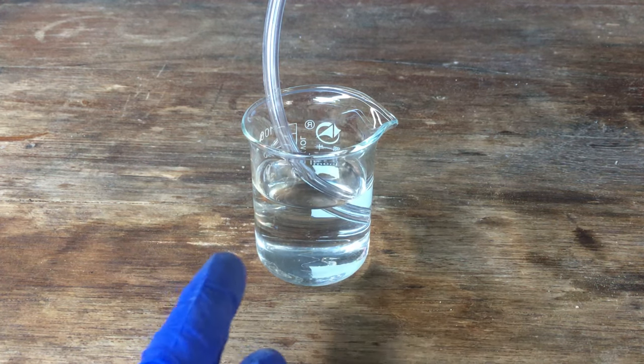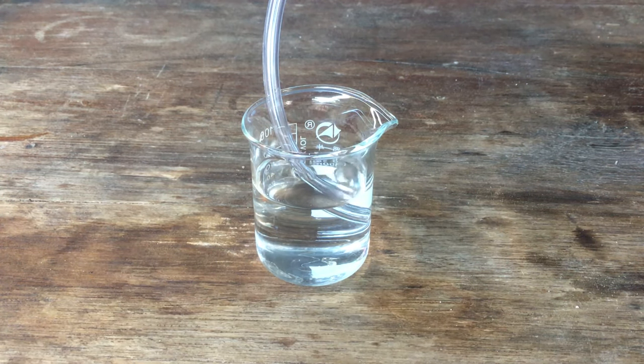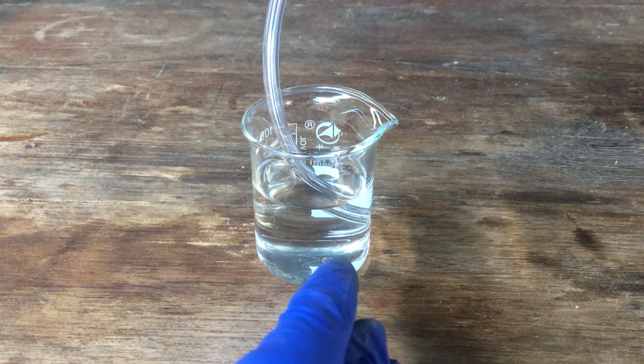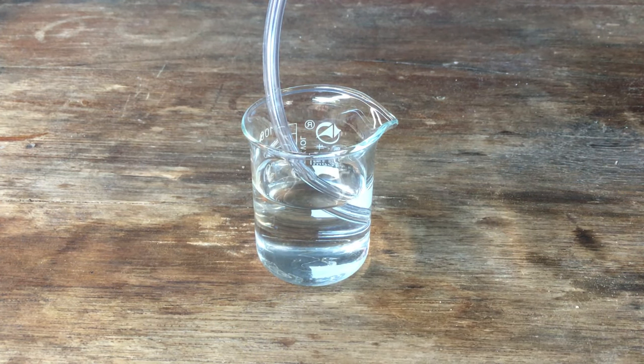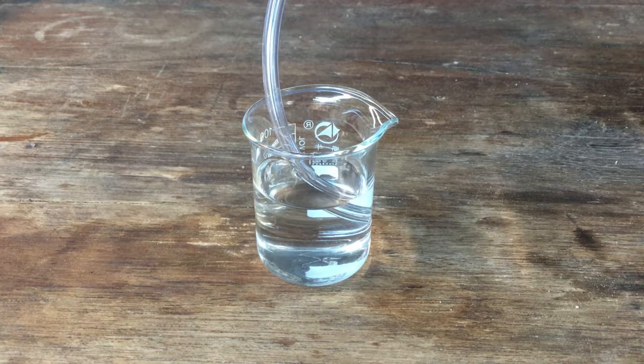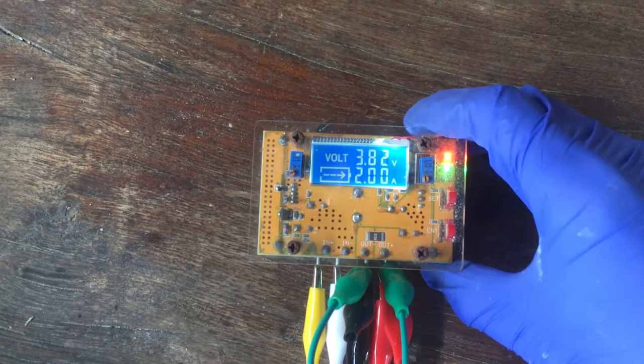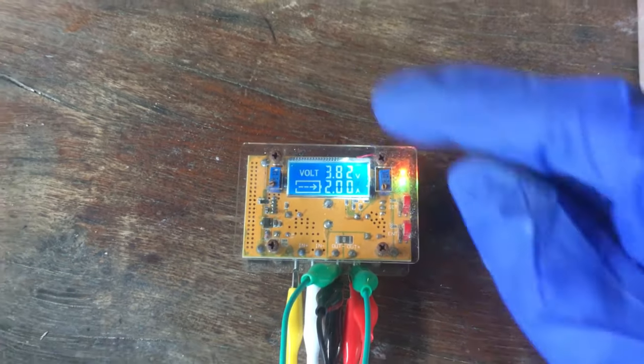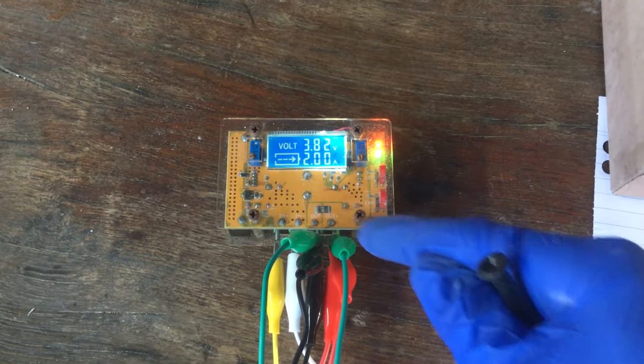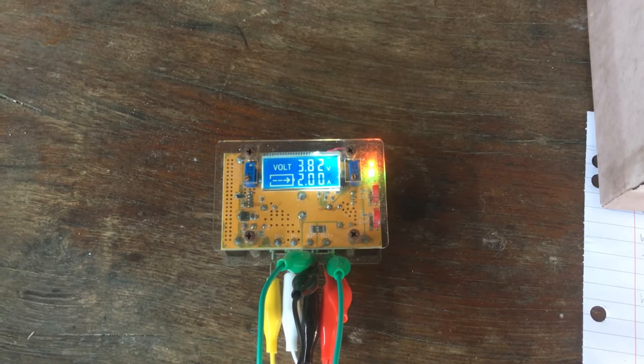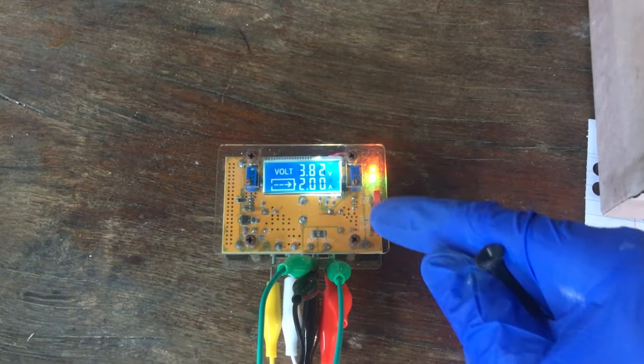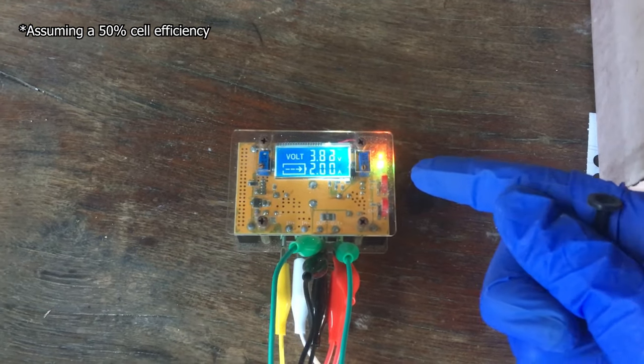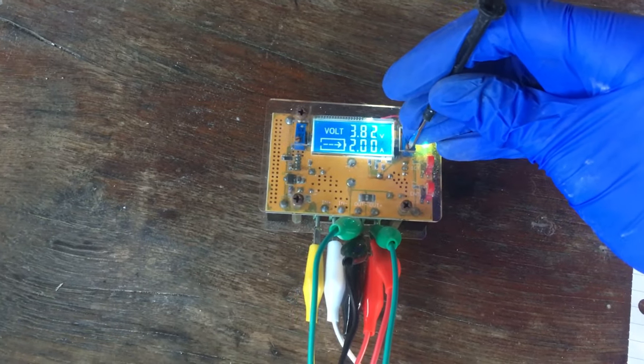As we can see, our gas scrubber is working as intended. I've sealed the cell correctly. We are venting all of our gases, currently hydrogen, chlorine and a little bit of oxygen, through our solution of sodium hydroxide. Our voltage and current is around 3.82 volts and around 2 amps. I am going to run it, I think, at 4.2 amps for around 18 days. That should give us our desired 400 grams of sodium chlorate in solution. So we'll turn that up now.